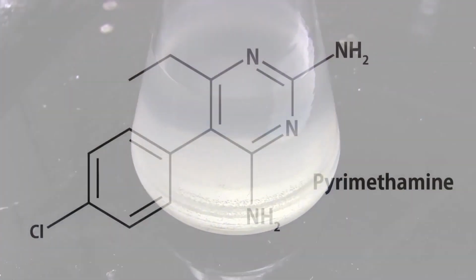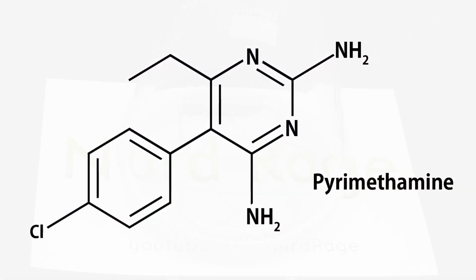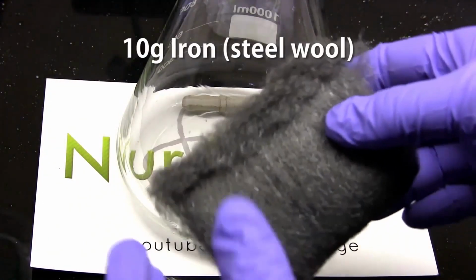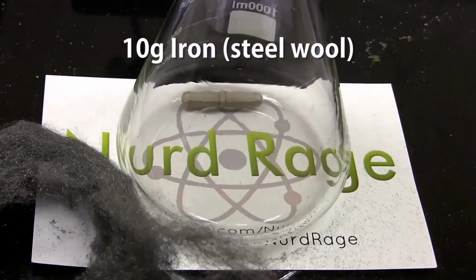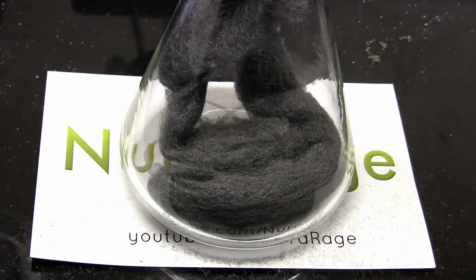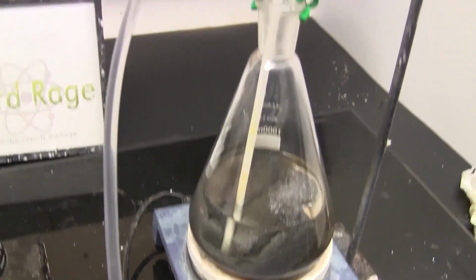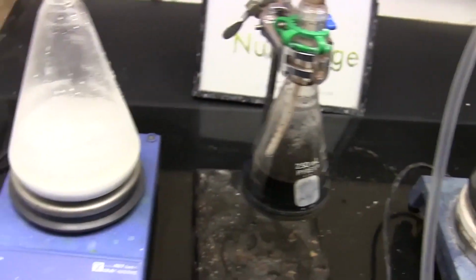This is the first step to making the antiprotozoal drug pyrimethamine. First, we get a liter-sized flask and add some fine steel wool. I'm using a 10-gram roll, but the exact quantity is not critical. Now we add 500 milliliters of toluene. Anyway, here's our mixture, and around it we set up this chlorine generator.